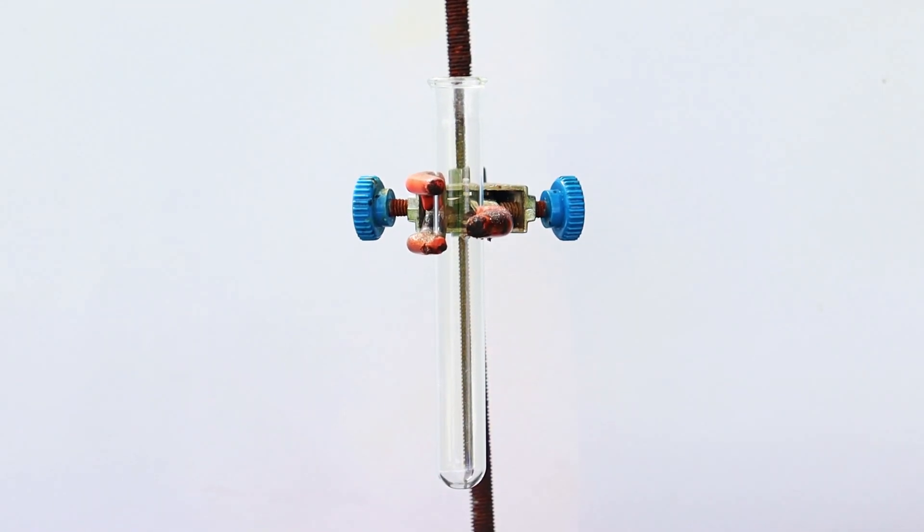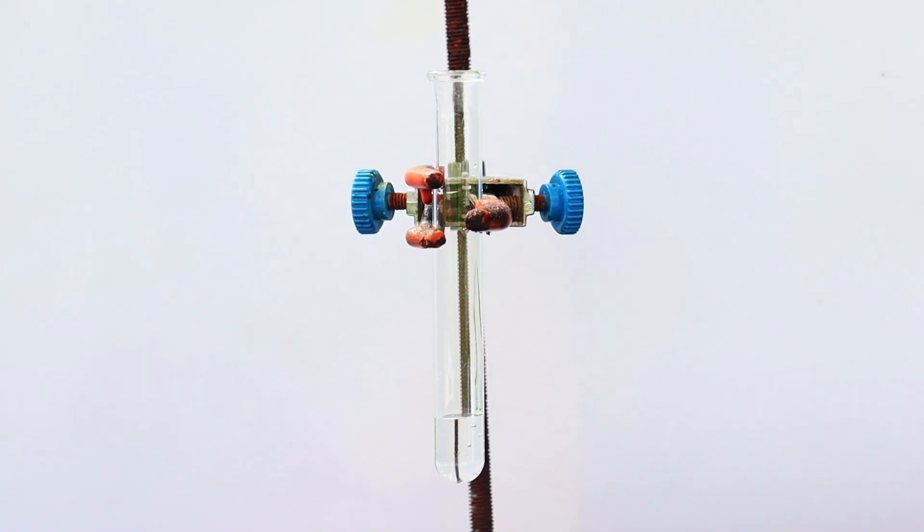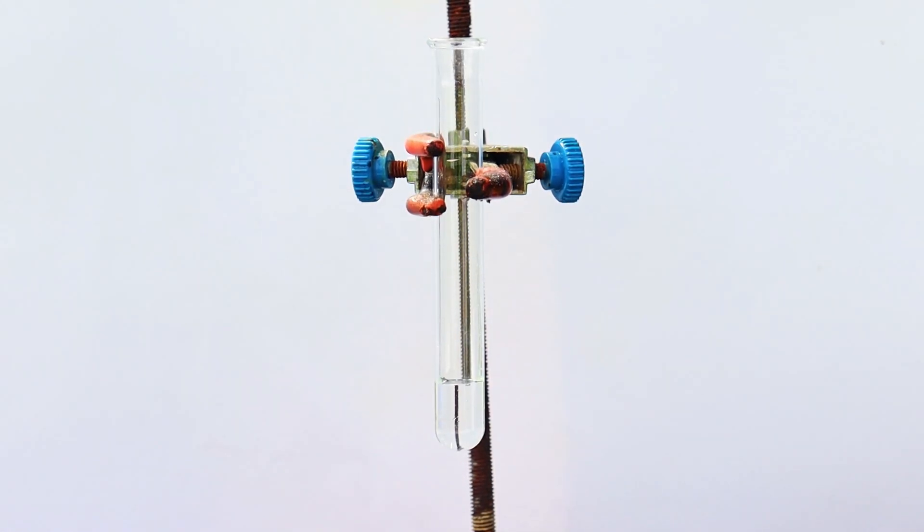Next, reaction with glycerine. I was quite excited that it would make a lot of nitroglycerin, which is a very powerful explosive. I was also very scared that the reaction would be very vigorous and that it would turn into a runaway reaction, but it turned out fine.